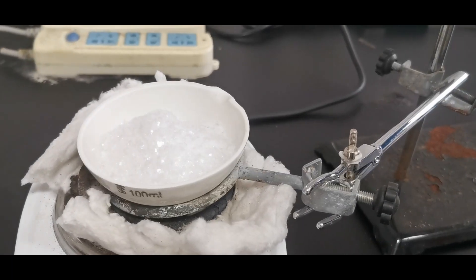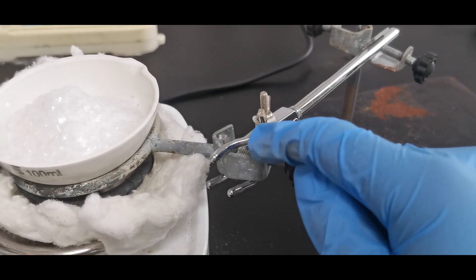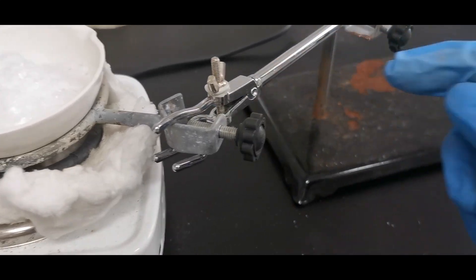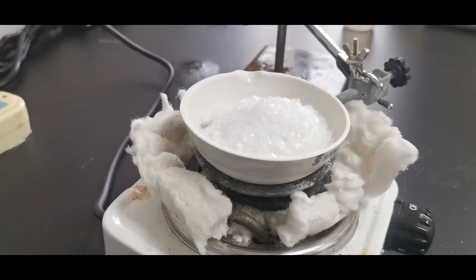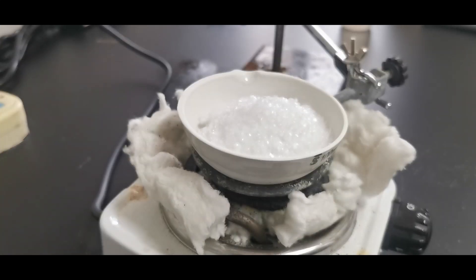The porcelain dish containing our chlorate was then hoisted above the furnace using an iron stand. Note that no plastic parts or joints should be used near the furnace, which is why I used two clamps instead of one. The stove is switched on, and the wool pieces are adjusted to insulate the dish better.